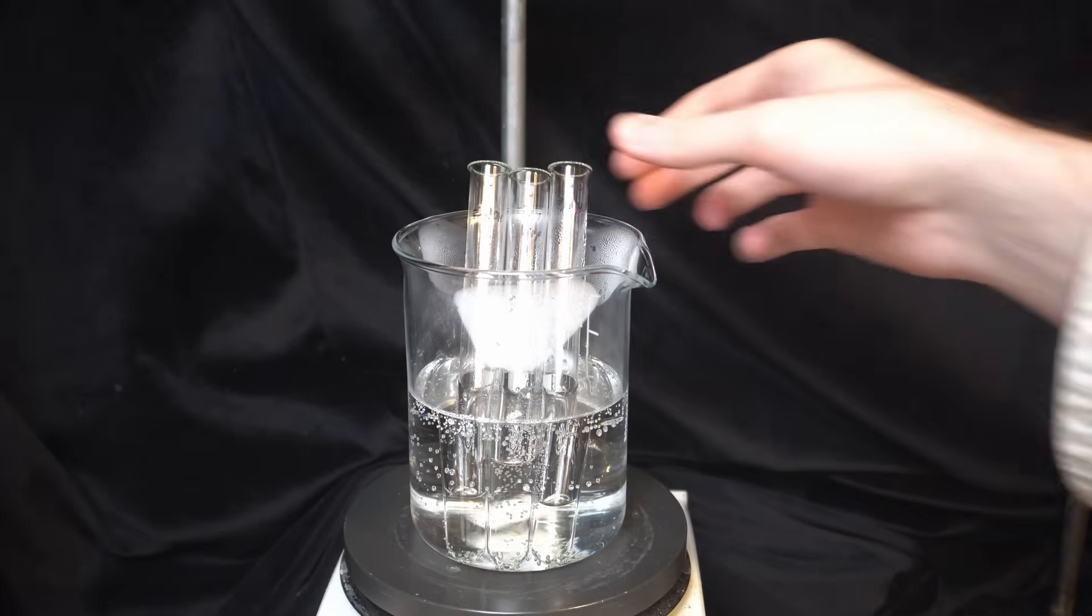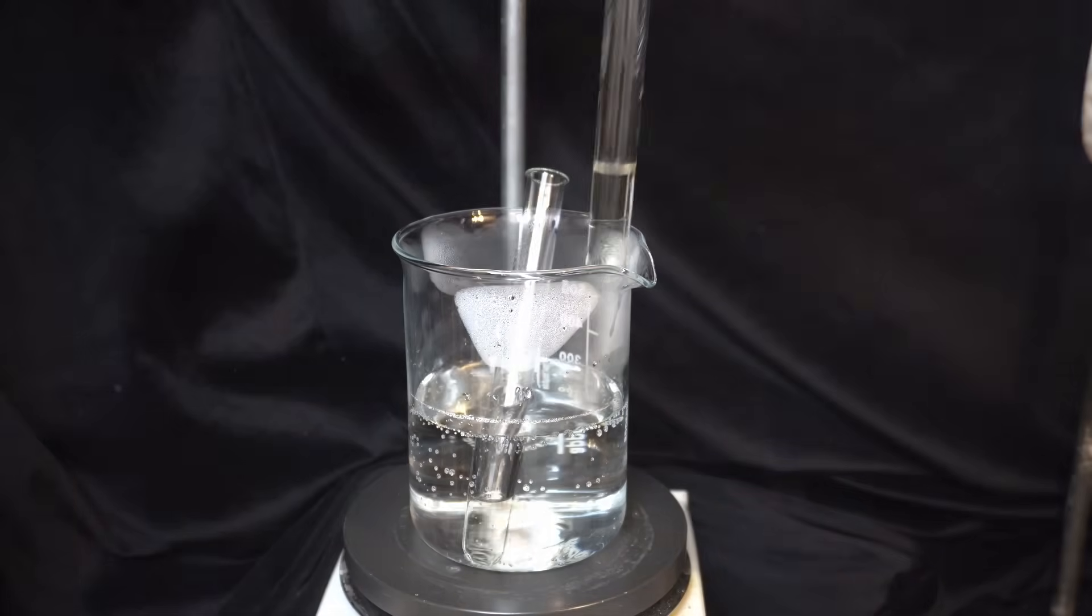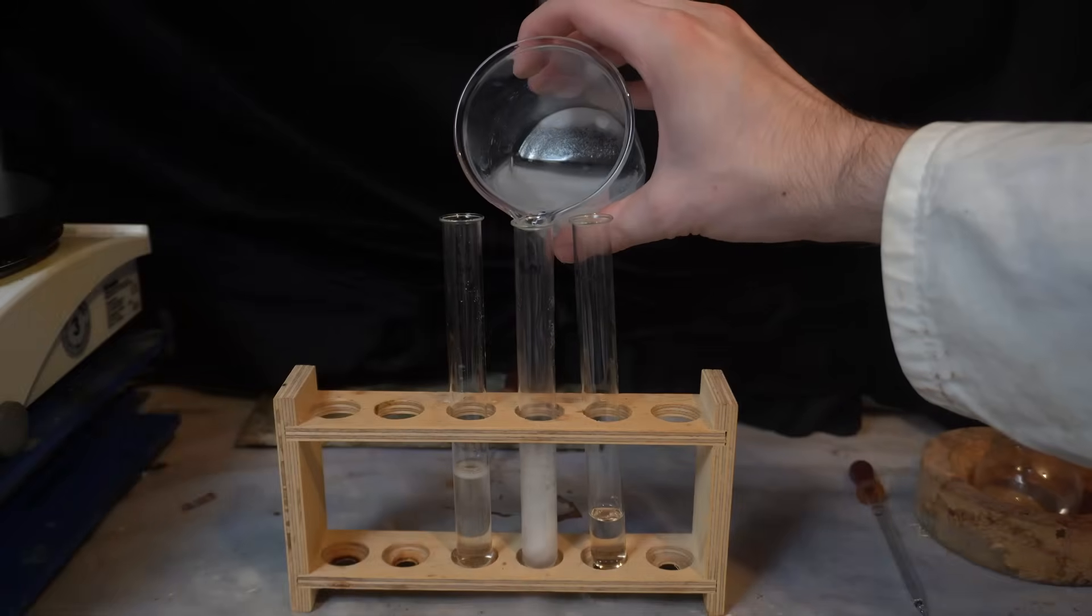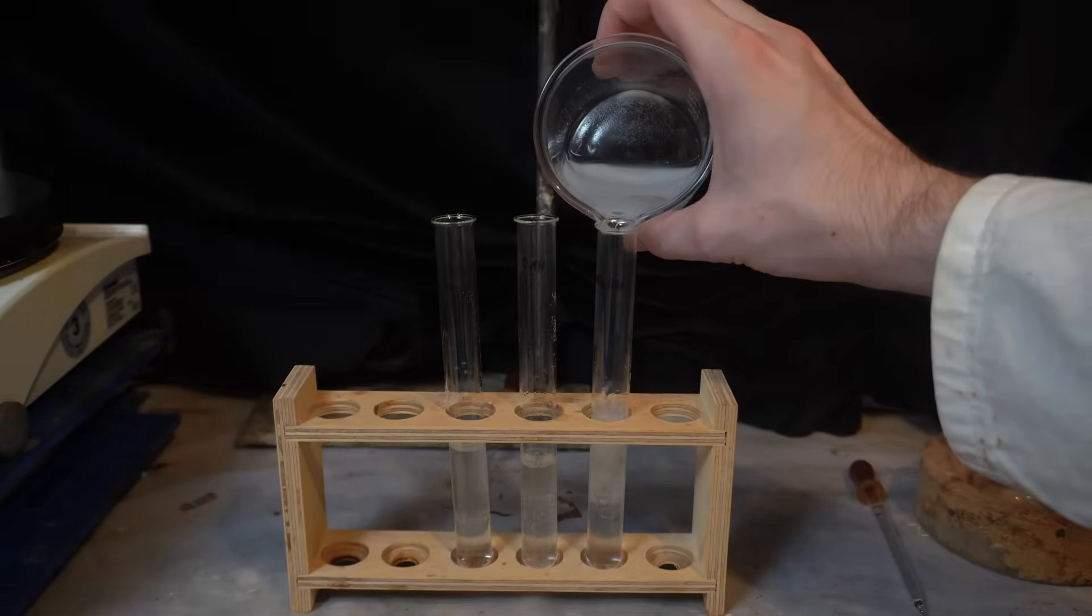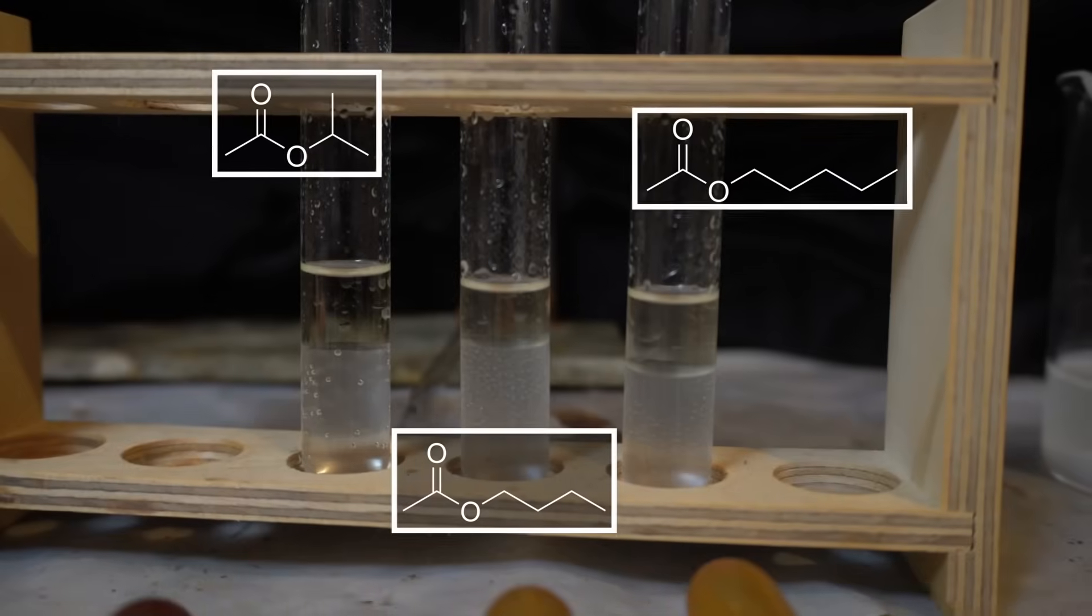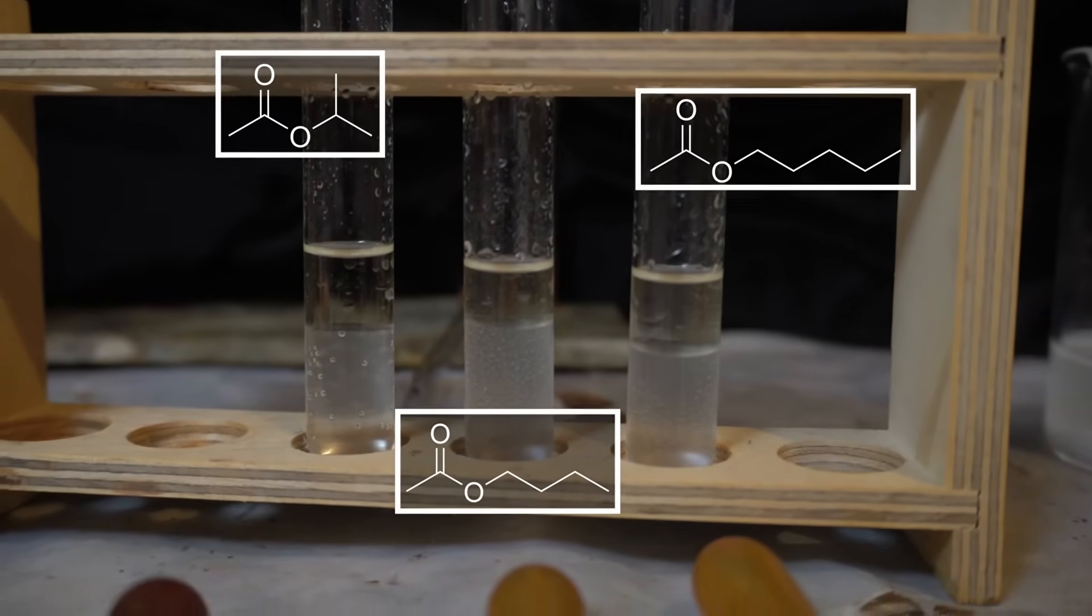The reaction should be done now, so we can take the test tubes out of the water bath and then do a quick workup by adding some sodium bicarbonate solution to neutralize all of the acid and washing it a little bit. And there you go. The upper organic layer is practically pure ester made in about 10 minutes.